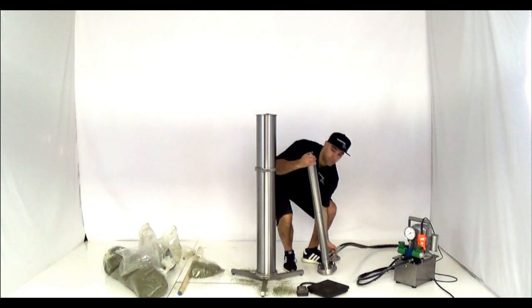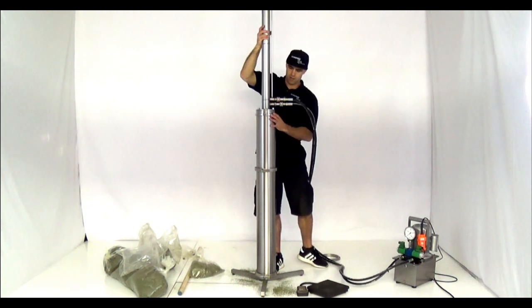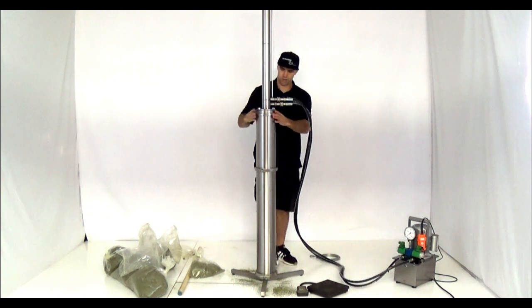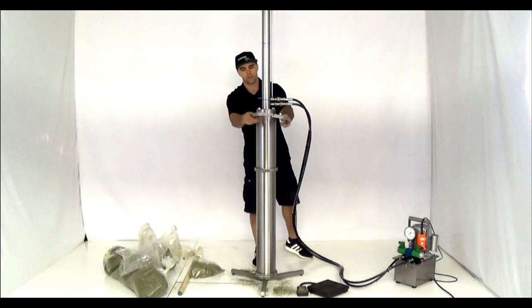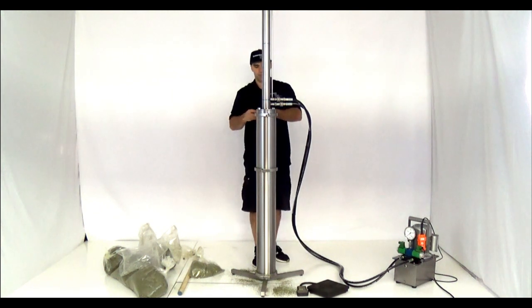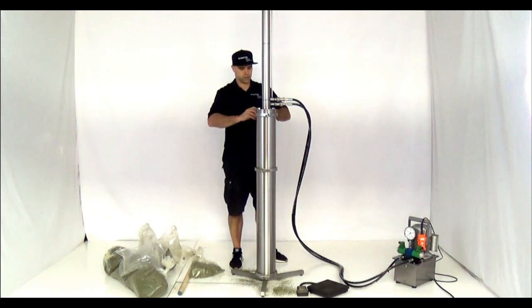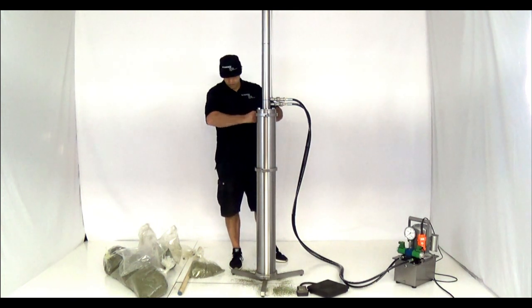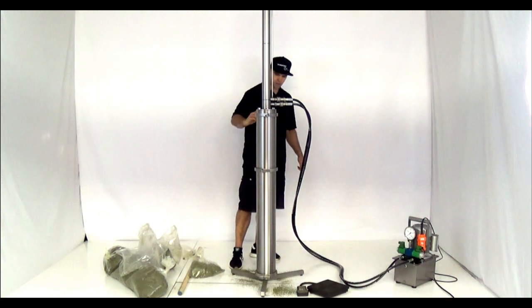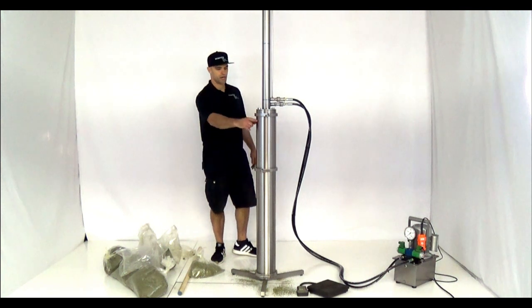So we're going to grab this, put it up here, just kind of center it on there, and put the other clamp on here. Got to twist these quite a bit because they were all set up for using gaskets. So that's on, everything's good to go, got all my clamps on, and we're totally full to the top with material.